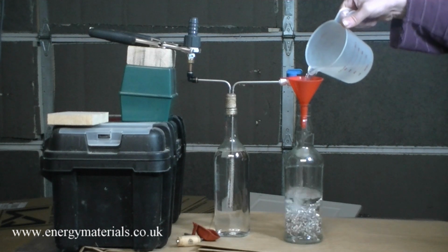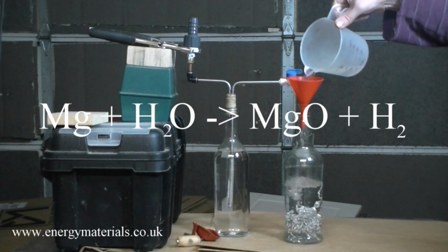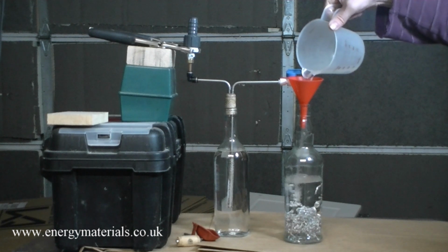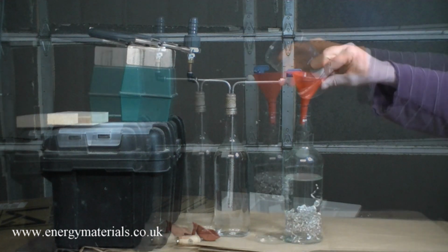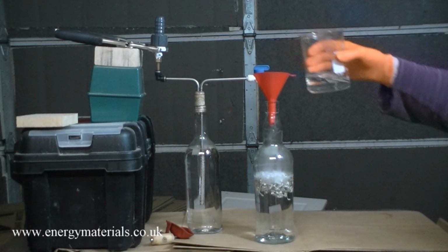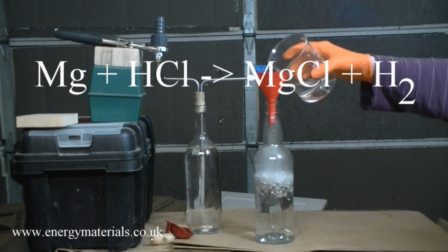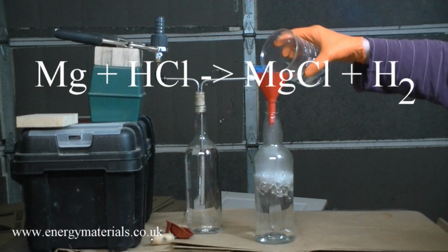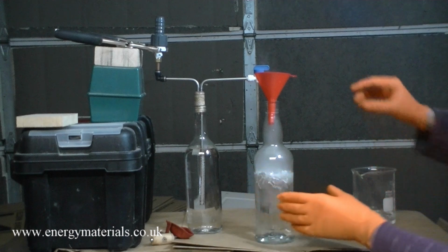Pure magnesium will slowly react with water to form magnesium oxide and hydrogen gas. Adding some hydrochloric acid to the water acidifies the liquid, and the magnesium now reacts with the hydrochloric acid to form magnesium chloride and hydrogen gas.